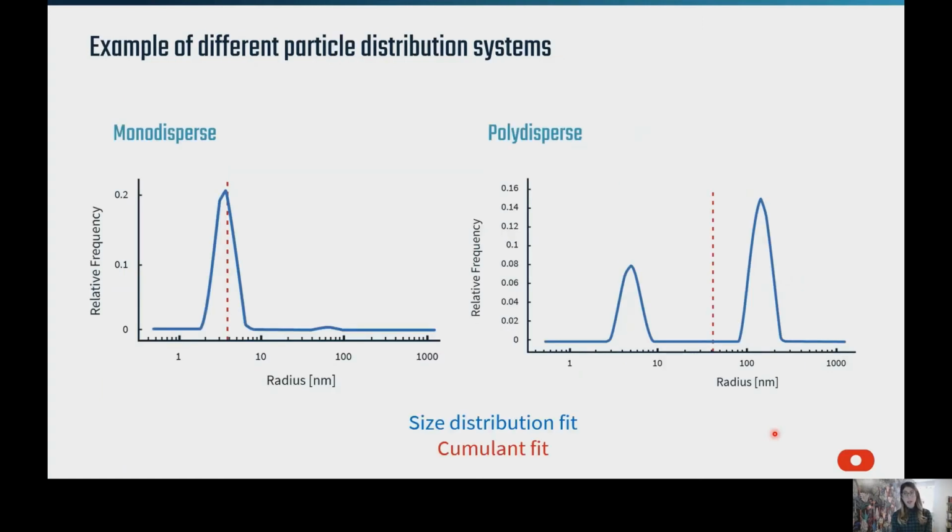So here we see the intensity distribution plots of a monodispersed and a polydispersed system fit with both the cumulant and the size distribution fits, where the scattering intensity is plotted as a function of the hydrodynamic radius. The cumulant fit is signified by this dashed red line. It has this shape because it's assuming a Gaussian intensity distribution, so there's going to be no change in the shape of that peak because it's always assuming a Gaussian distribution. The size distribution fit, however, is shown here by these blue peak shapes. The width of the peak is going to change depending on the dispersity of the particles in solution. So for instance, in a monodispersed system seen on the left, there is a single particle species, and we see that the cumulant and the size distribution fits overlay quite nicely because the peak is very symmetric for these single species populations.